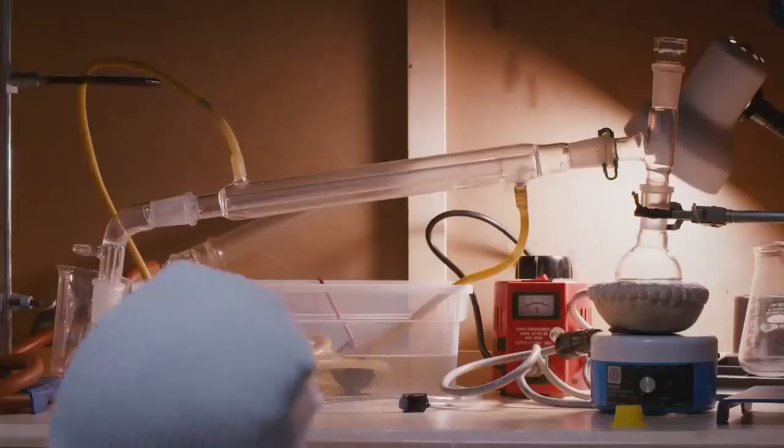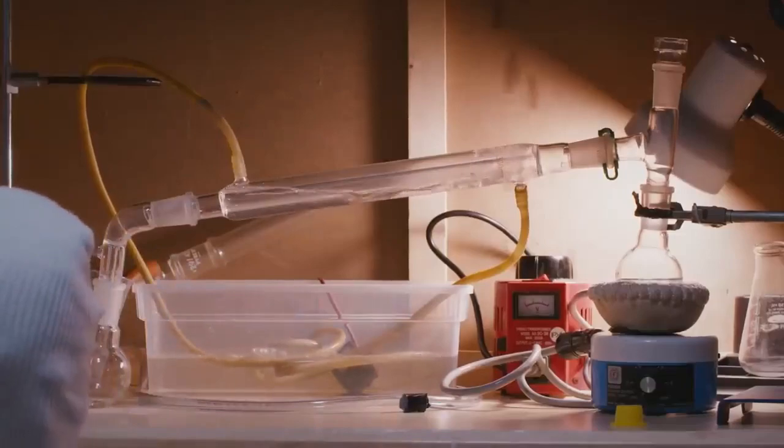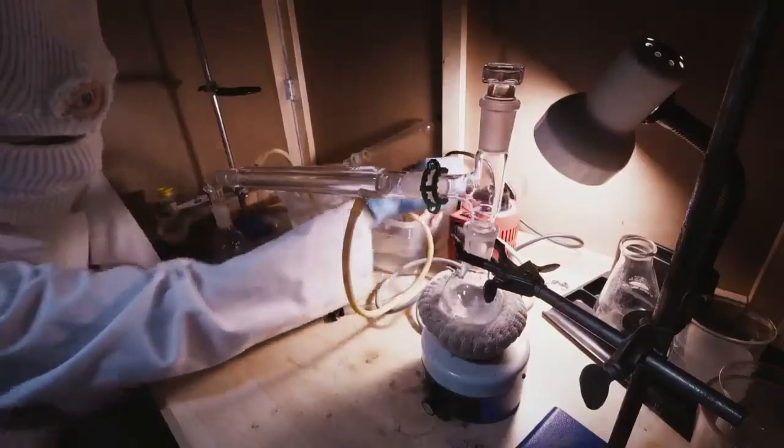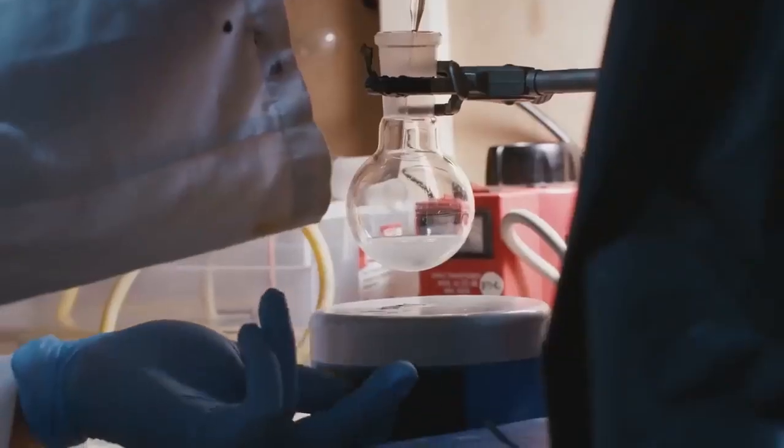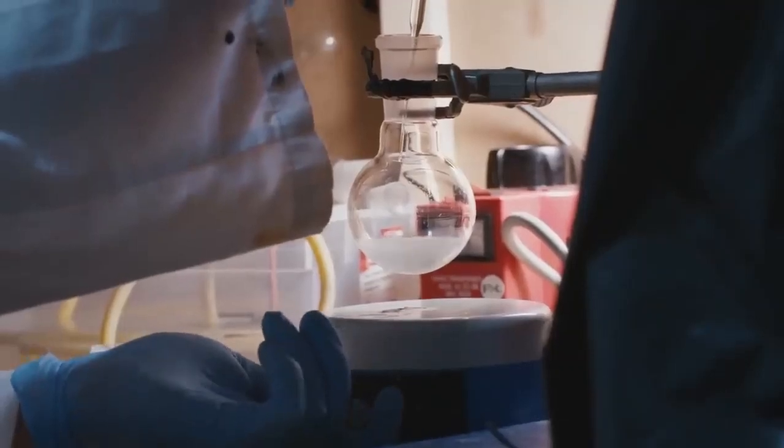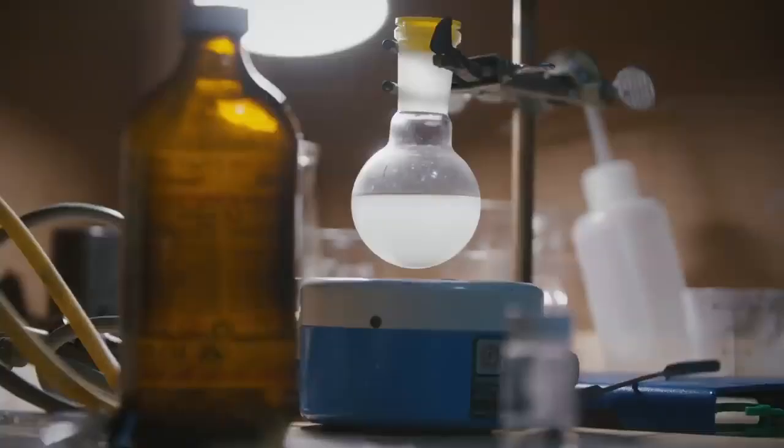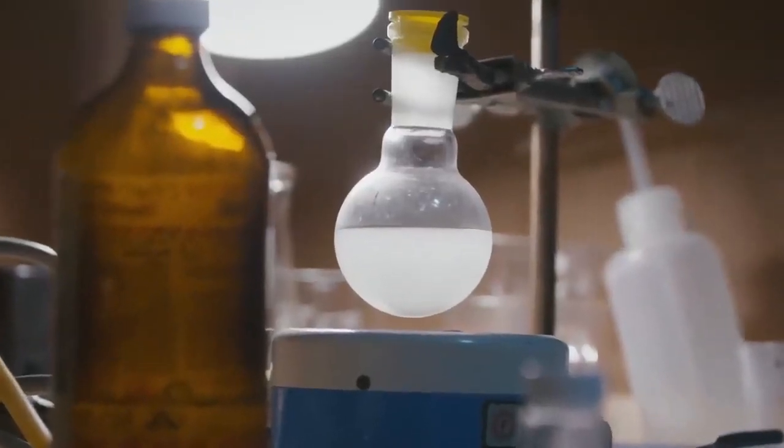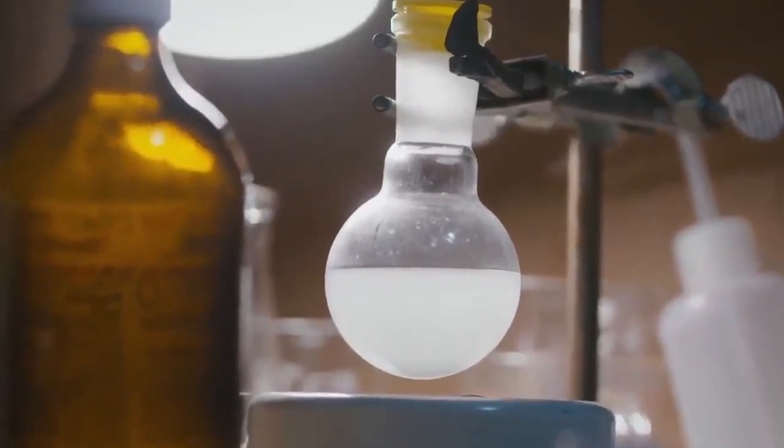This is the only way I know how I can share it with other people, is to pursue the kind of research I'm interested in. So this is essentially the end of it. It has been precipitated out of the fumarate salt in this ether-acetone-DCM mixture. But this is it. That's DMT. It's just synthesizing.